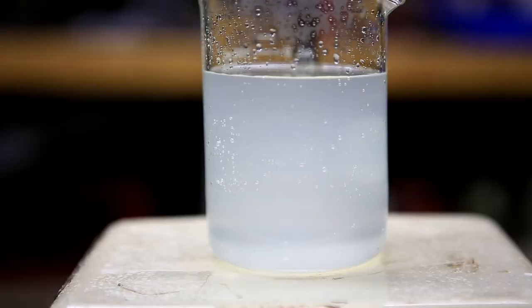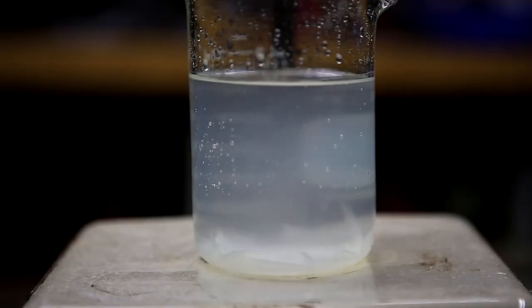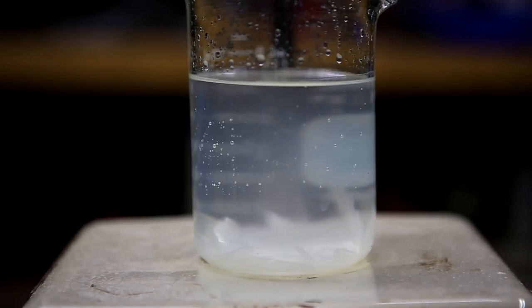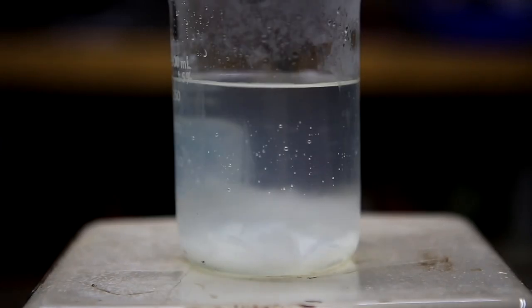The solution was allowed to cool to room temperature and potassium chlorate crystals began to form. Once the solution had reached room temperature the beaker was transferred to a freezer to precipitate out as much as possible.